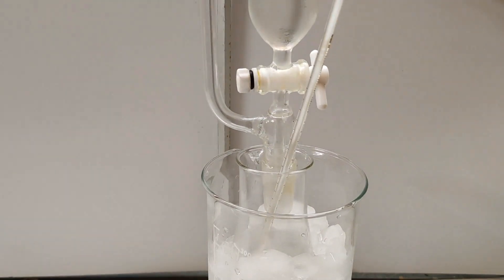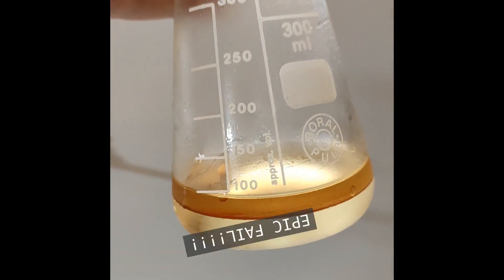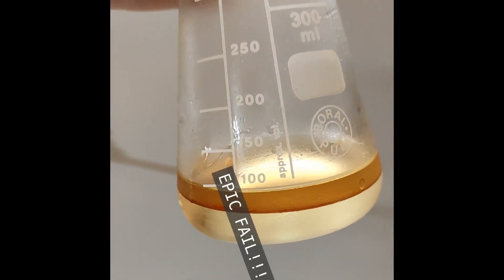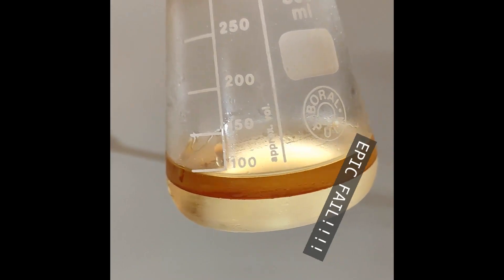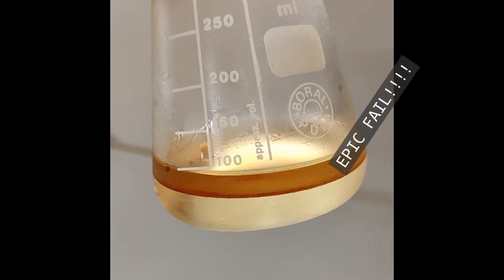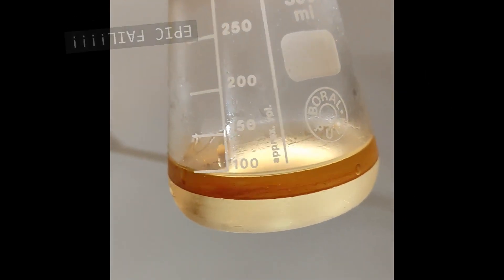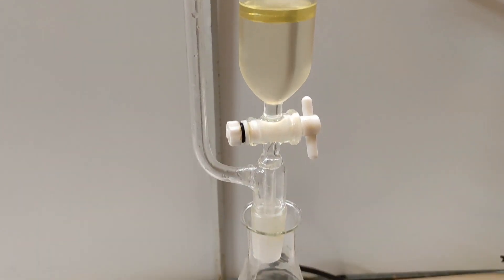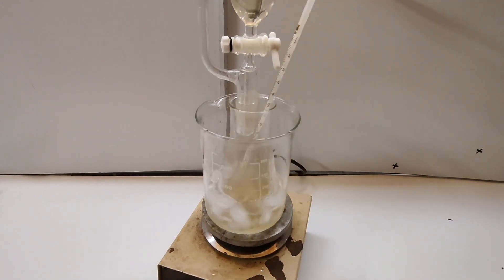Sadly, the nitriding mixture was added too quickly with insufficient stirring. This resulted in a lack of reaction and the formation of two distinct layers. To salvage the reaction, the layers are separated and the acid is added more gradually this time.